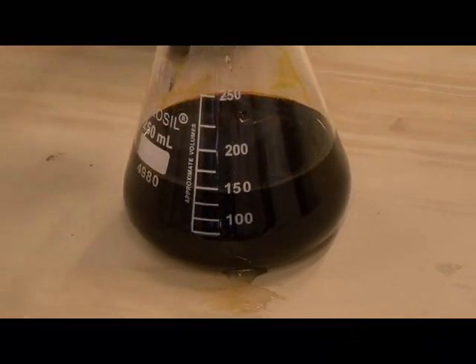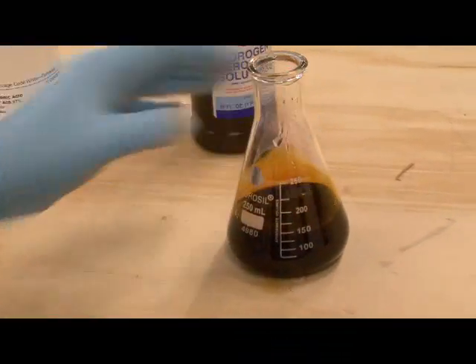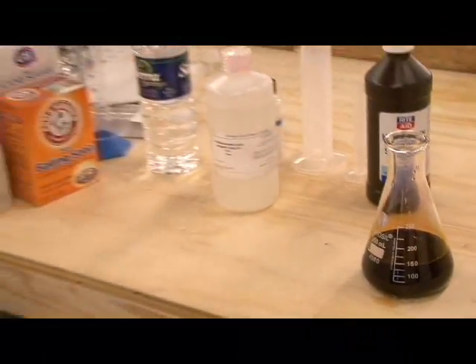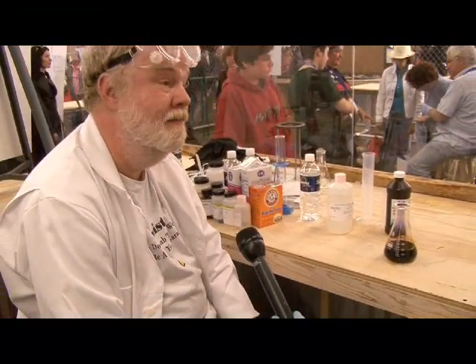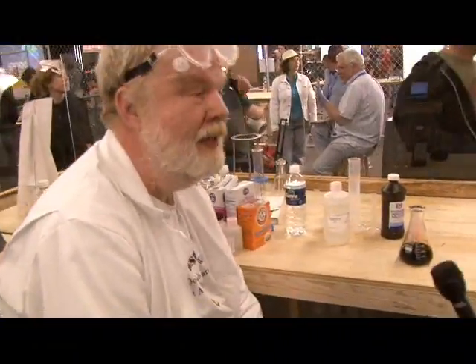It's not actually a brown solution — what it is is a suspension of crystal iodine. We can filter this stuff through a coffee filter, and we've just bypassed the DEA's List 1 restriction on crystal iodine. Thank you so much, Bob. Thanks — it's been great to be with you, Phil.